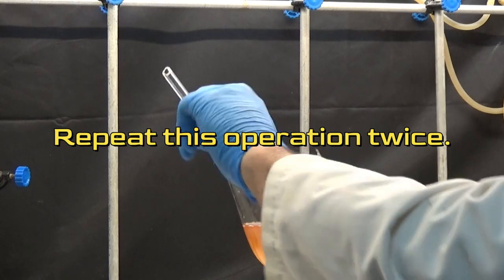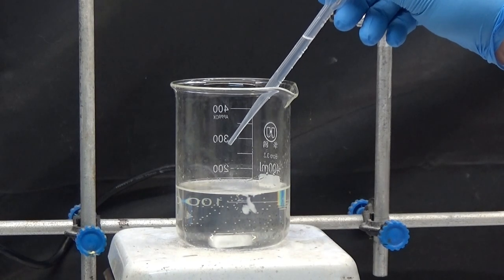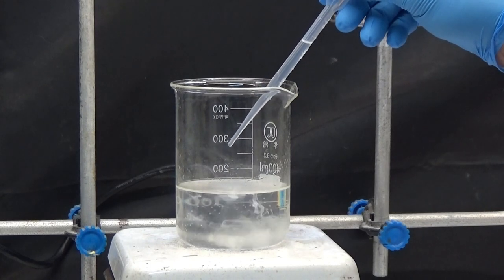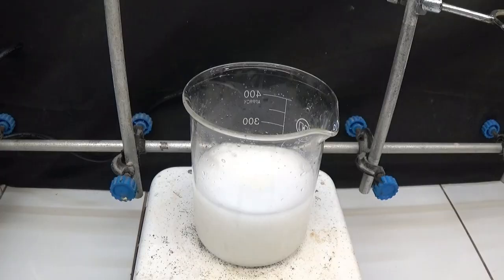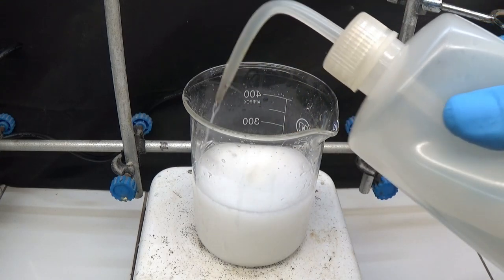Repeat this operation twice. The aqueous sodium phenylacetate solution is cooled with ice and acidified with concentrated hydrochloric acid to pH 2.